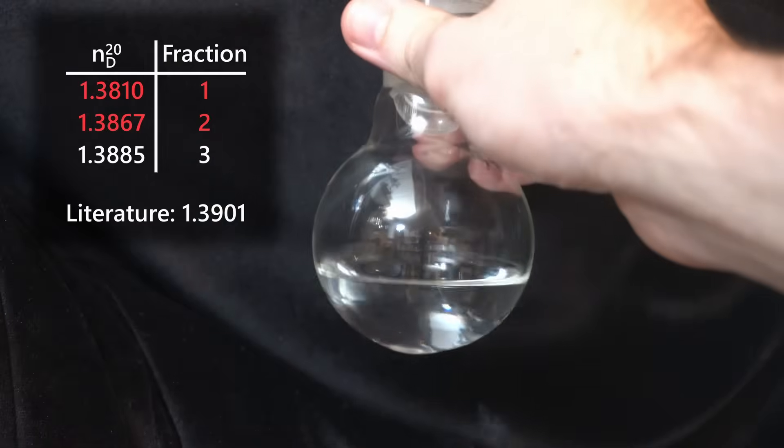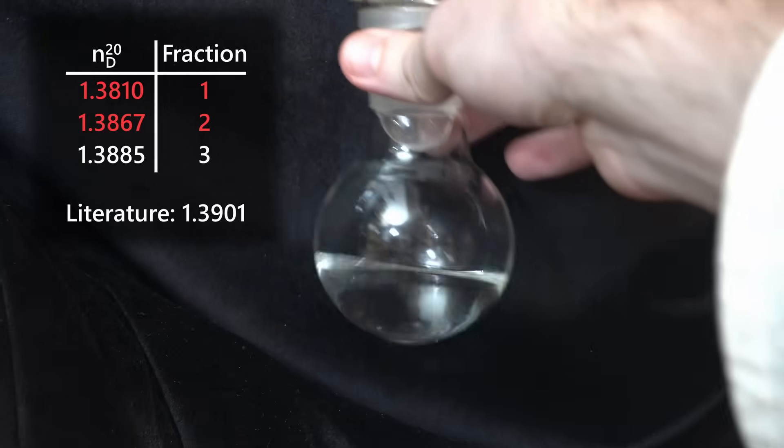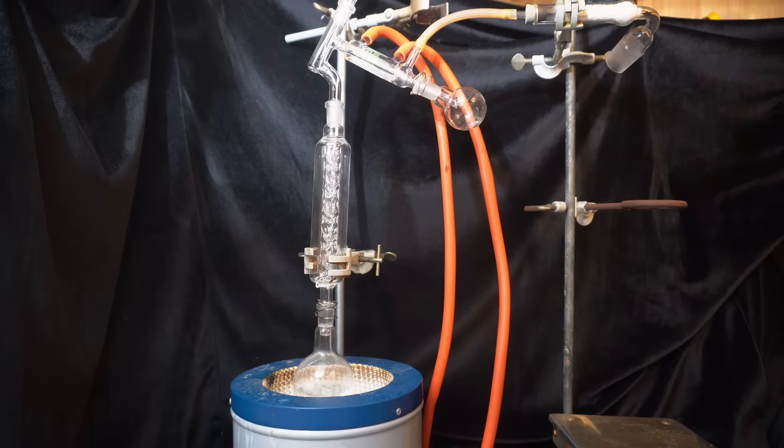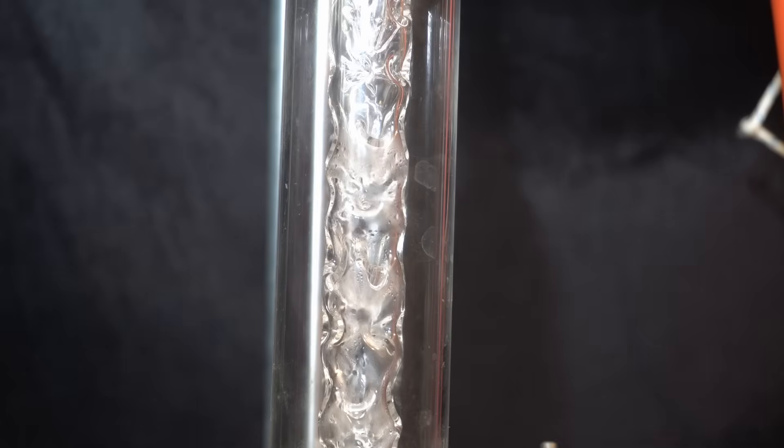The other two fractions, however, are a bit further away, so I want to distill them again before using them. Since this is only a very small amount of distillate, I don't need the big still for this and can instead use a smaller one.